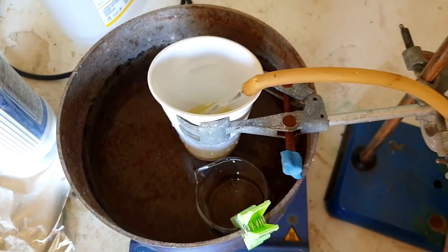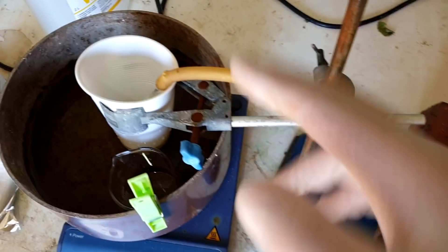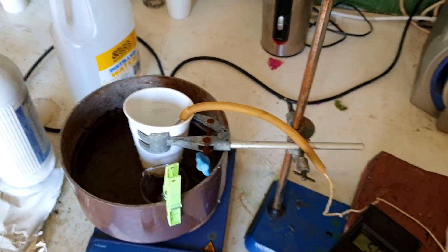Very rapid update — it's out of control. It's boiling and the temperature keeps rising; it's out of the water bath. I went and did something about it. Alright, I got it back under control — I just put it in some normal water and that cooled it down. That didn't happen before; I've done this reaction once before and it didn't do that. That was a little bit unpleasant. We're trying to avoid that happening again.